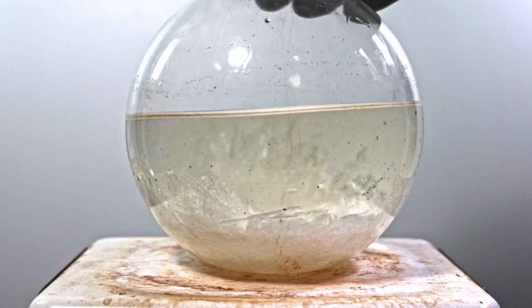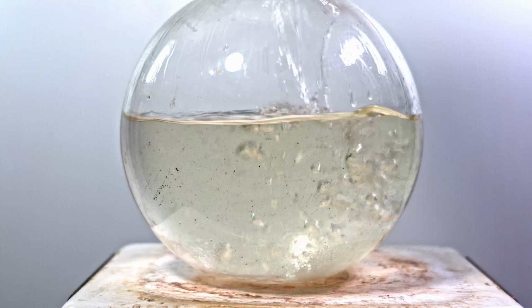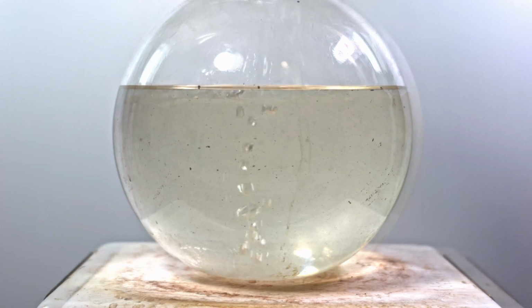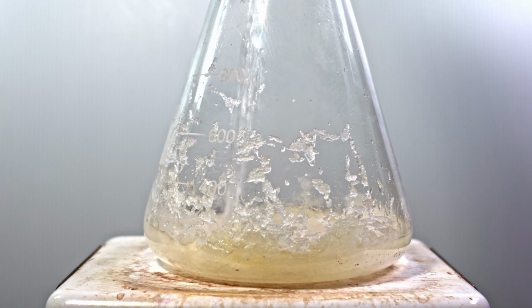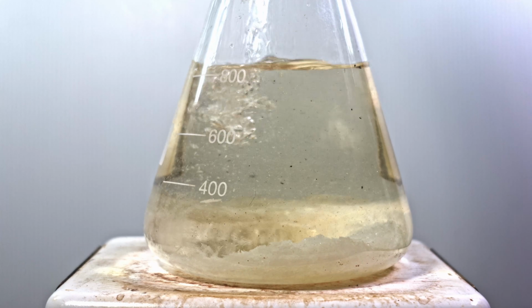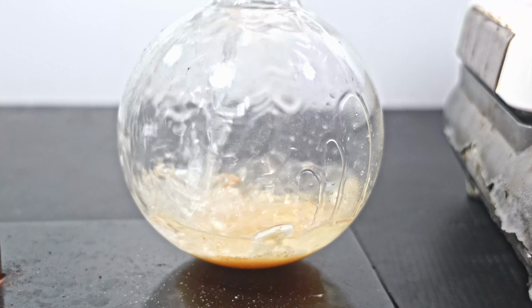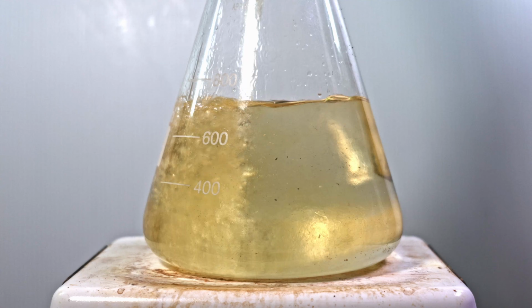I boil it hard until the crystal chunk dissolves. After an hour, there's still a stubborn bit left, so I add another 100 ml of azeotrope and 50 ml of hydrochloric acid. That gets it clear real quick. I add this to my Erlenmeyer crystals. A lot of it dissolves pretty easily, but boiling quickly eats the rest. I pour off some into the salt cake and heat it until it all dissolves. I add this back into my bulk solution.